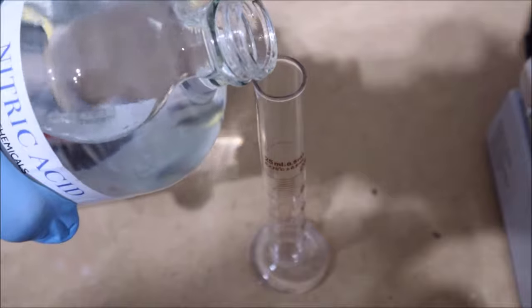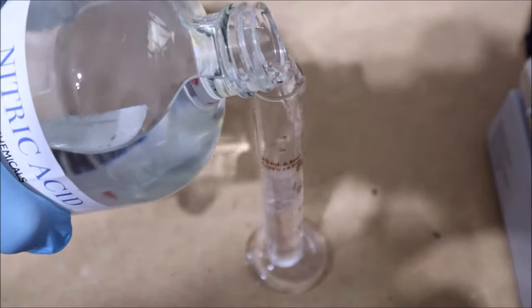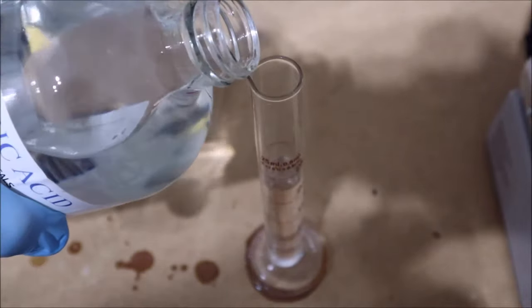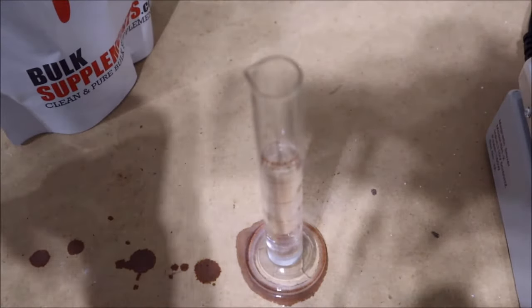You'll notice it's a first because I also pour this nitric acid all over my bench here. Don't do this at home, by the way. It will ruin the beautiful things that you've created for yourself and worked so hard to do. Not recommended.